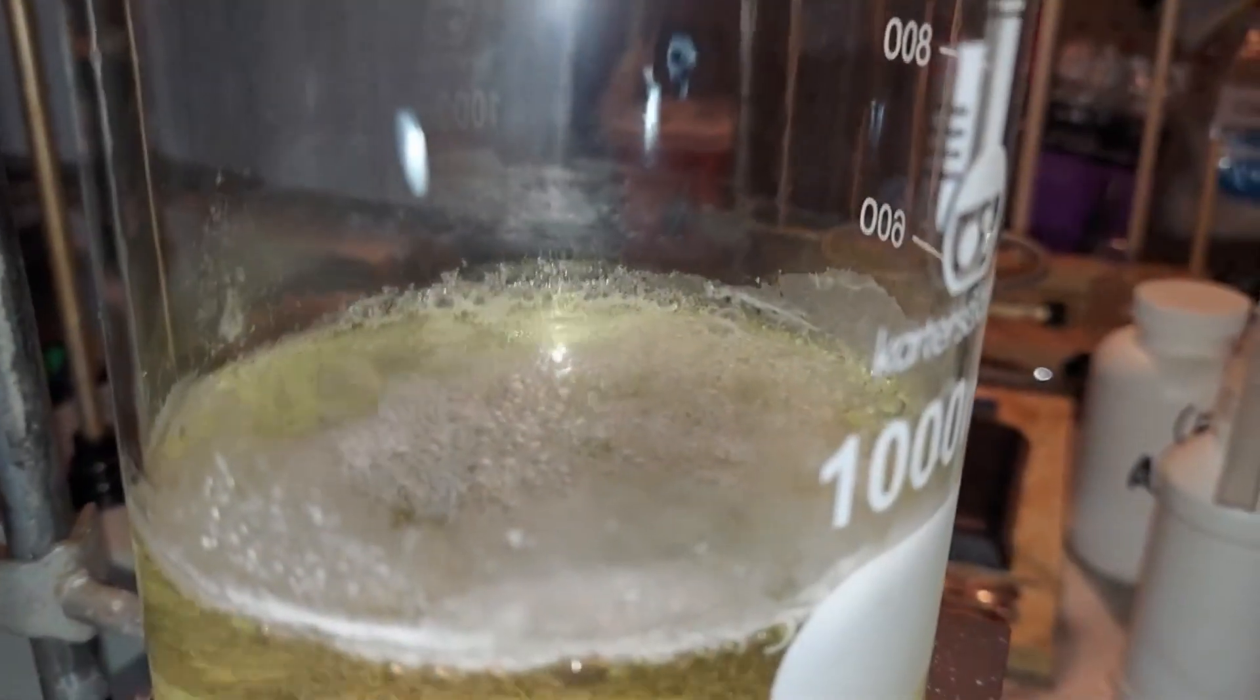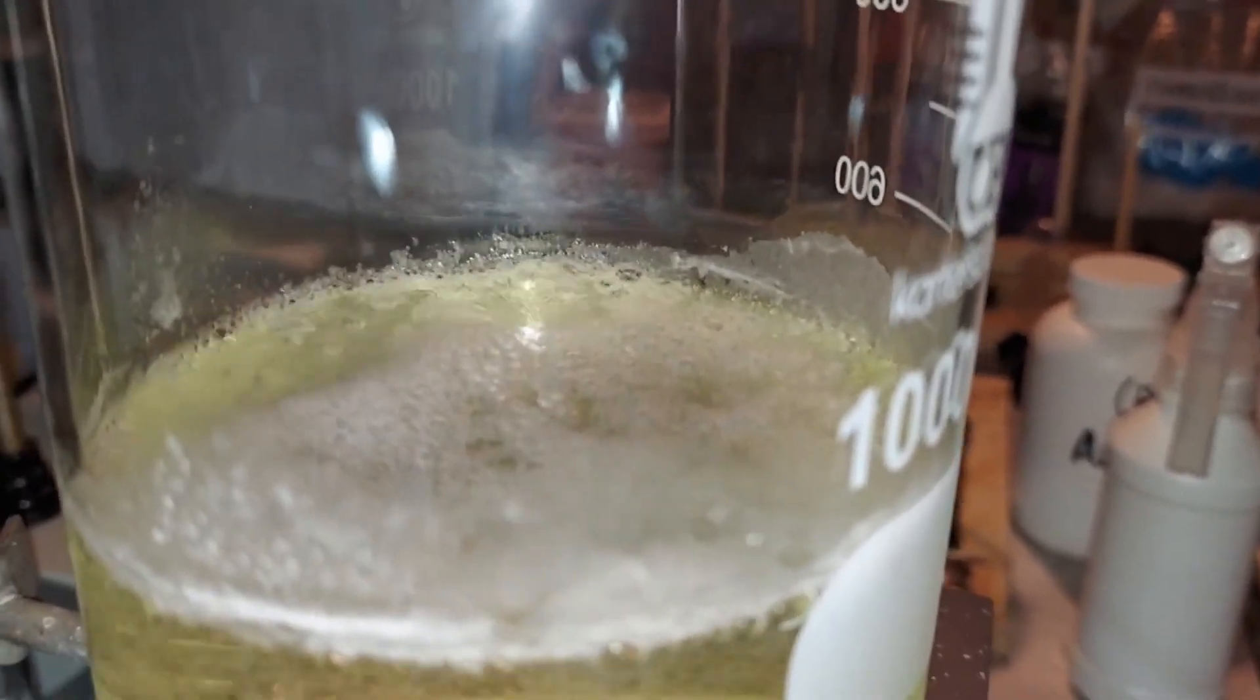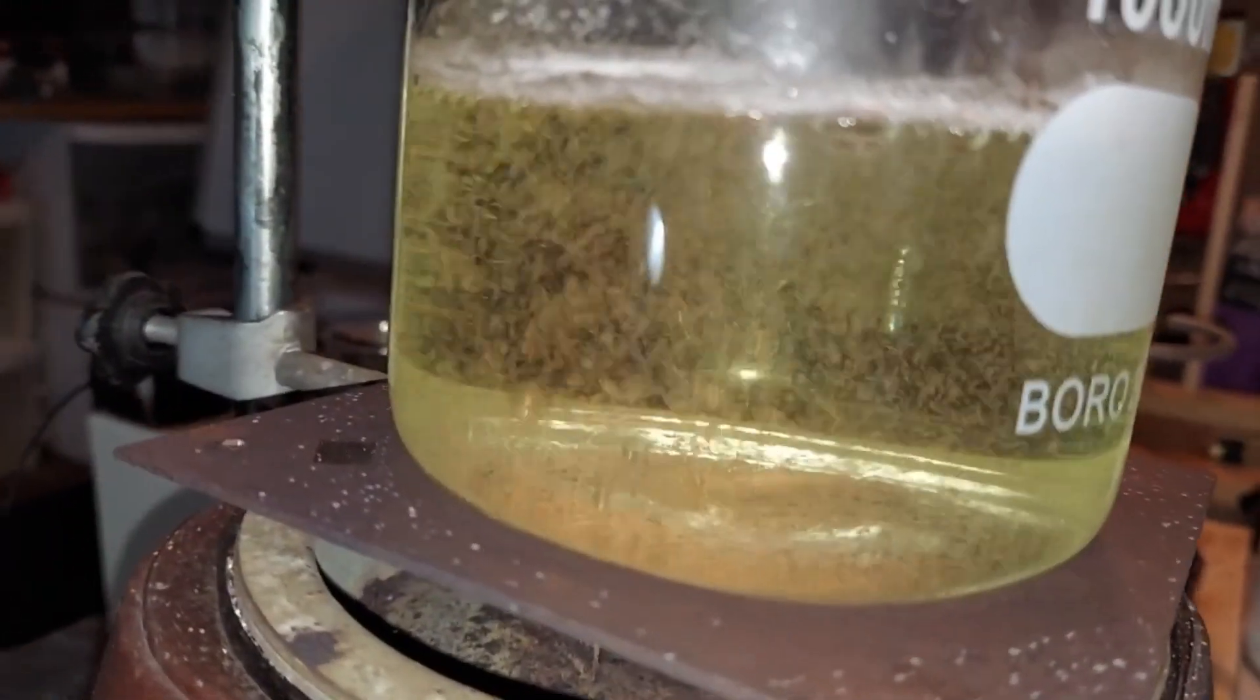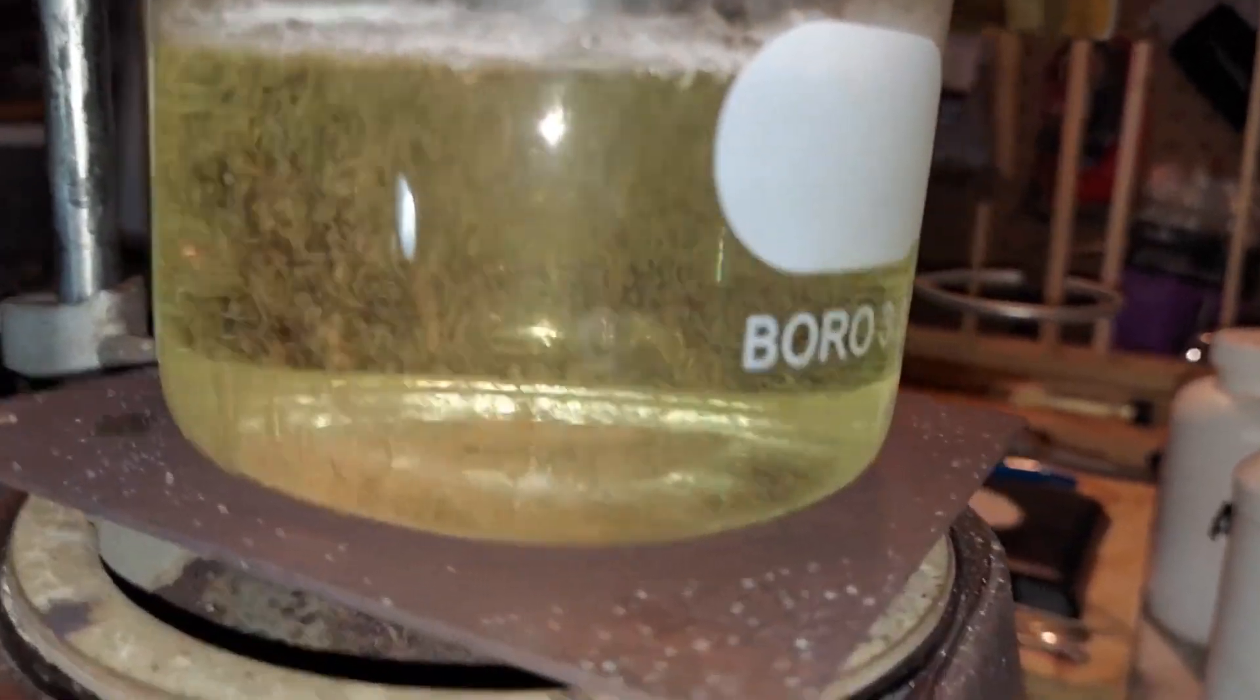If you look carefully, there's a solid that's gathering on the sides of the beaker here. We're down to just about 400 milliliters, and occasionally I can see a crystal in there bouncing about, and it's time to quit.